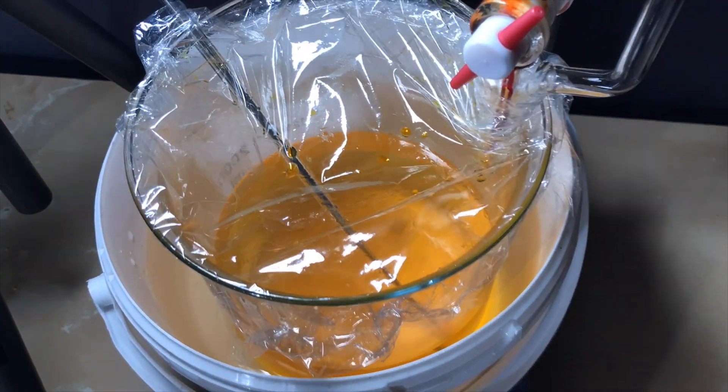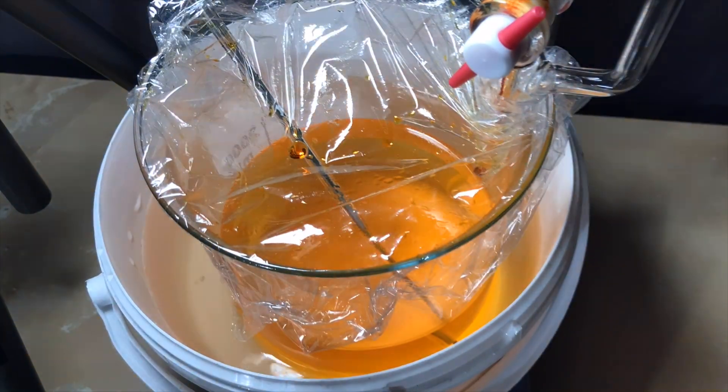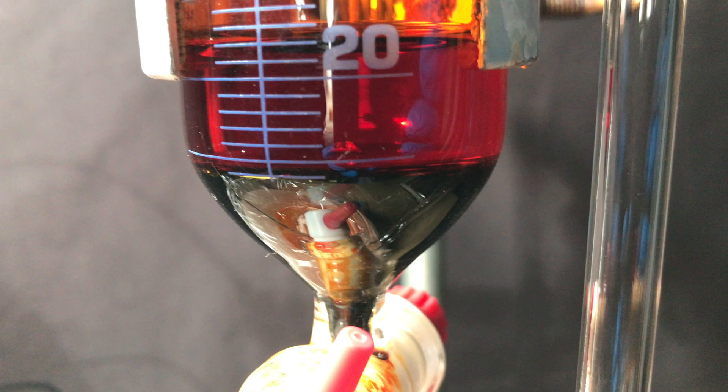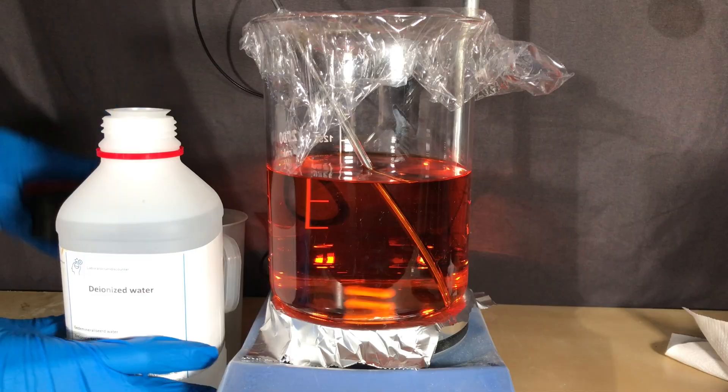If the temperature gets near the 20 degrees celsius you can place the beaker into an ice bath to cool it back down. In the beginning the solution was yellow but as we got towards the end of the bromination it turned a darker red.